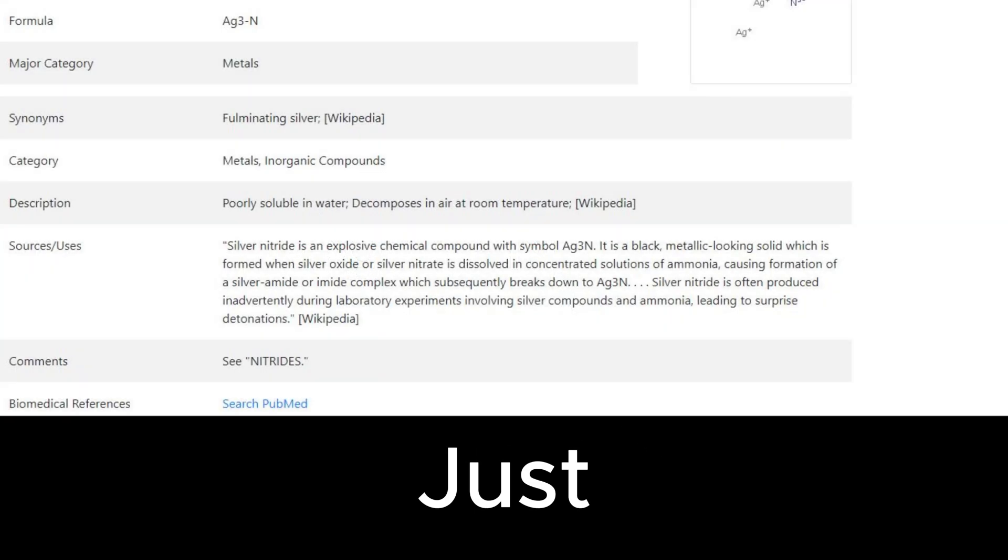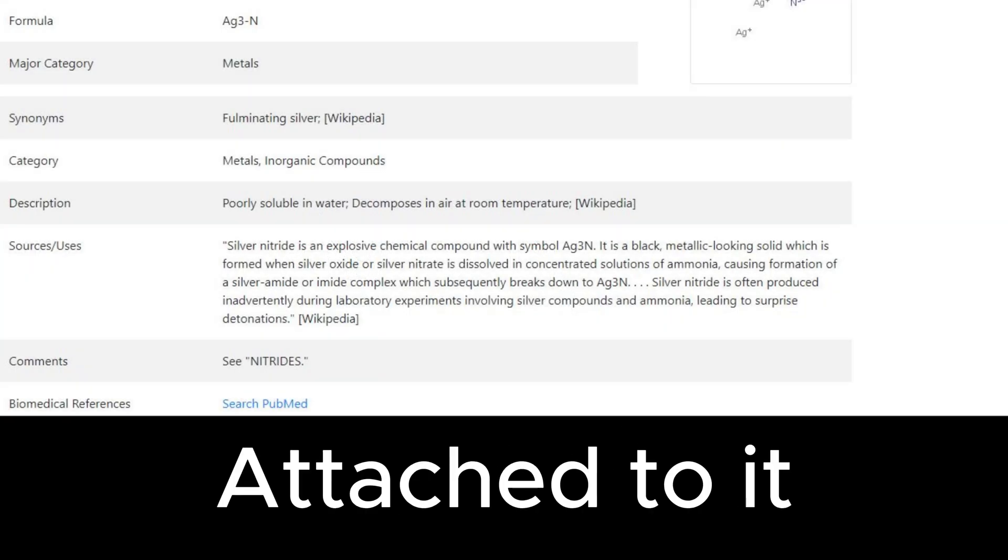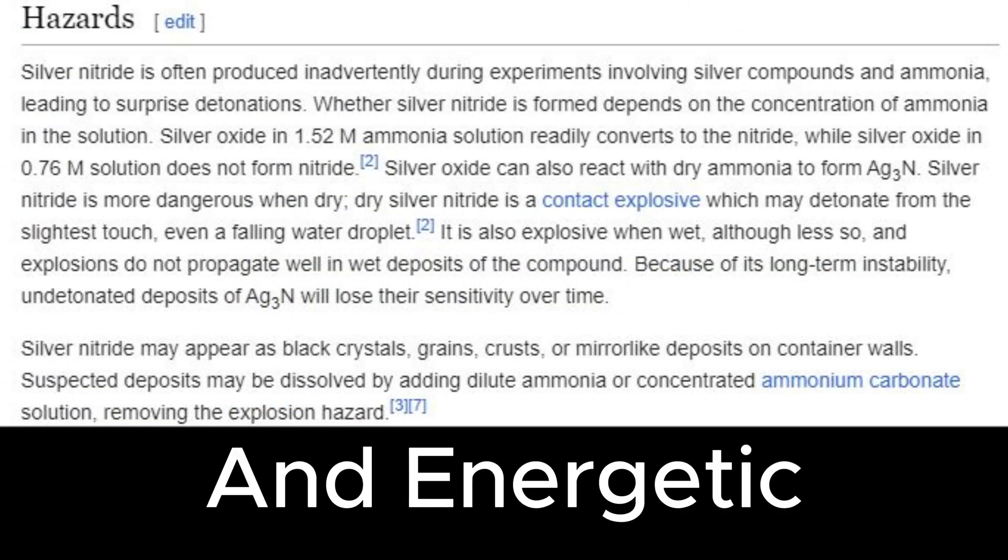This is silver nitride, it's just a nitrogen and three silvers attached to it. It's a relatively sensitive and energetic compound.